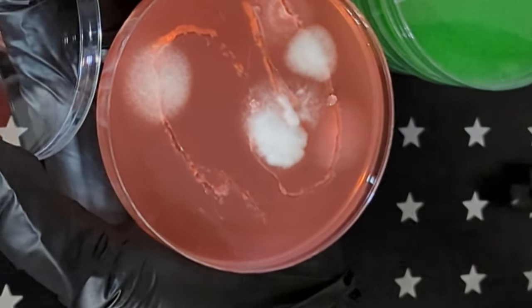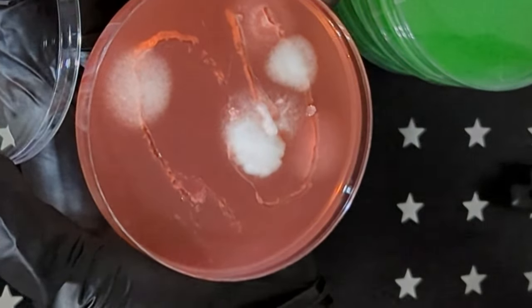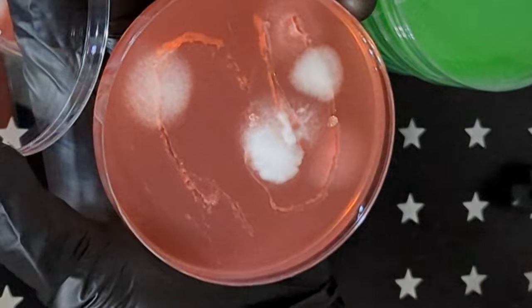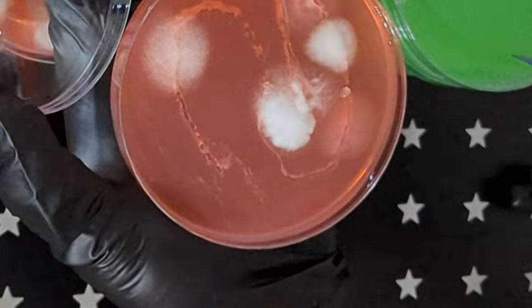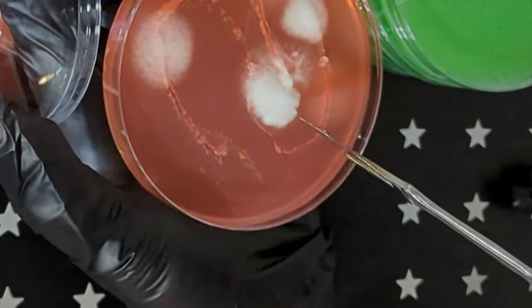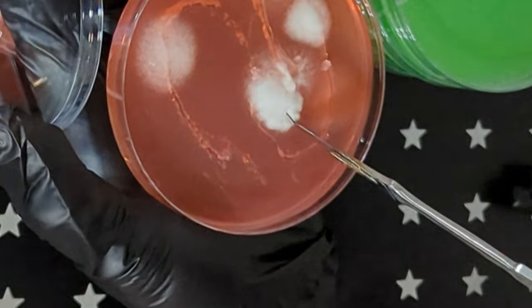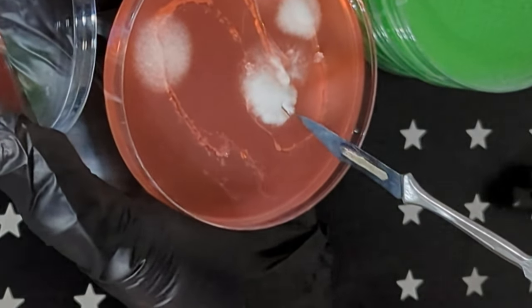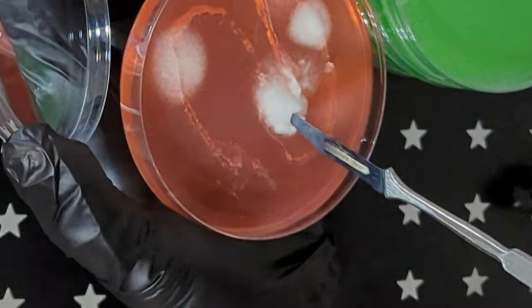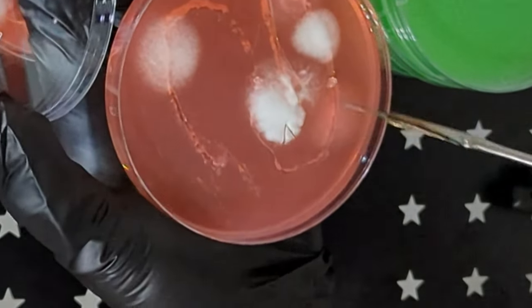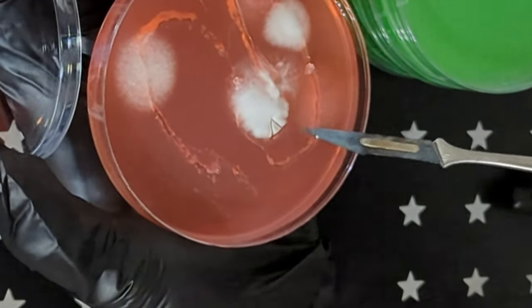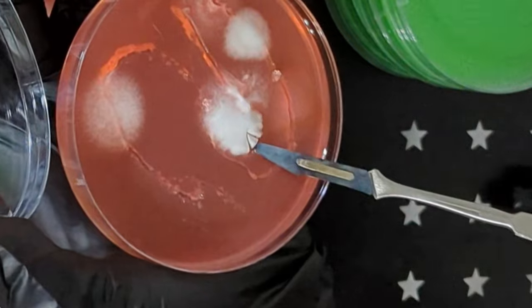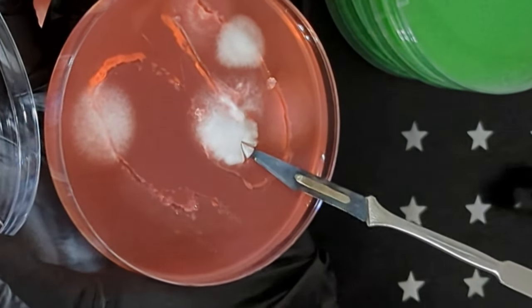You can use tweezers to subculture as well. You really only need a very small strand of mycelium to start a new culture. If you use tweezers and are making small subcultures with it, it's important that the tweezers cool off completely after you heat sterilize them. Dealing with such a small amount of culture, it will be very easy to burn and kill it with the tweezers if they're still too hot. Otherwise, like with the scalpel, you just grab some mycelium and transfer it to a new plate.